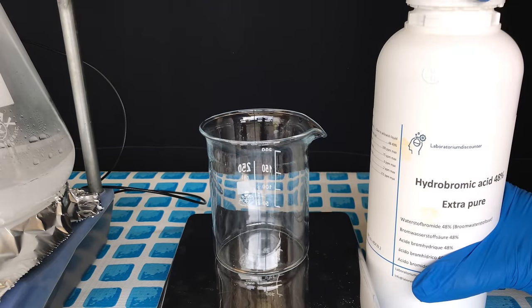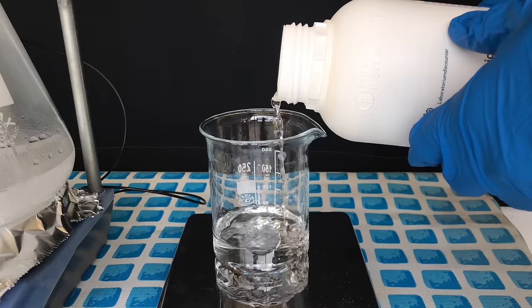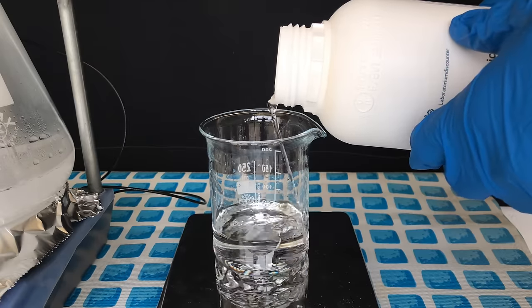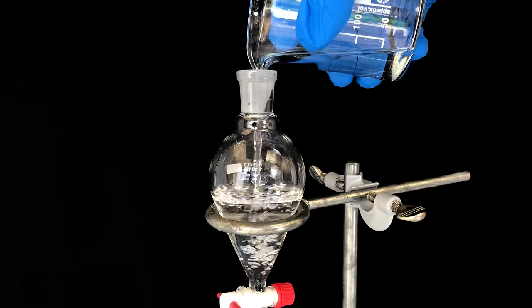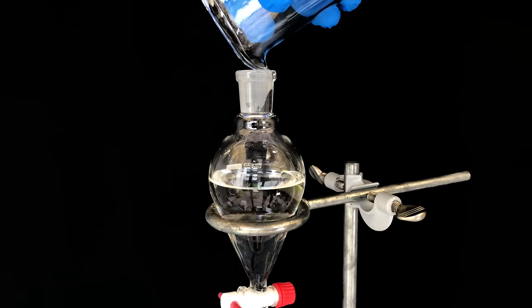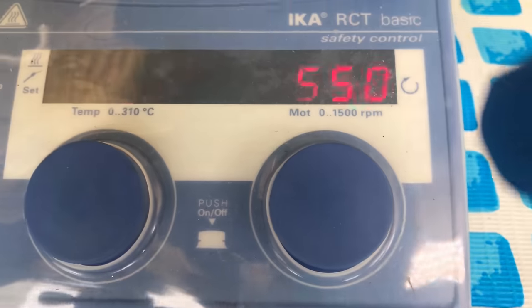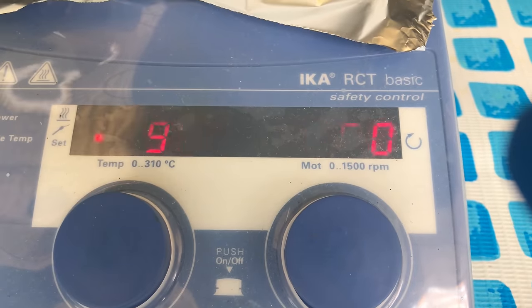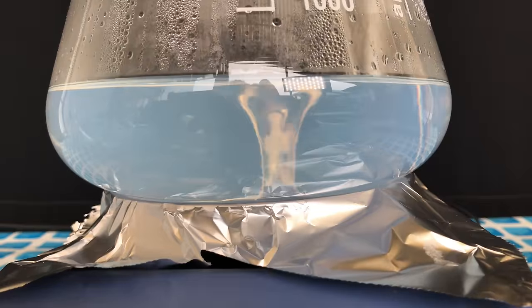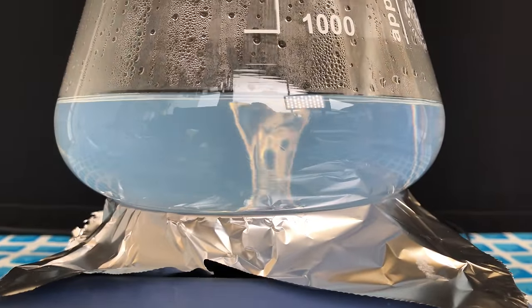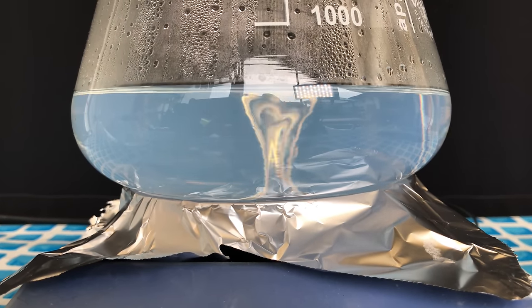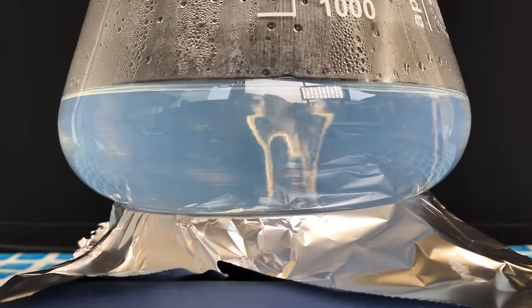Back to the hydrobromic acid. You're going to need about 130 grams, but you don't want to add too much, so you only add hydrobromic acid until the solution turns clear, and if you add too much, you're going to destroy your product. The hydrobromic acid was added slowly, while maintaining a reaction temperature of about 95 degrees Celsius. The acid was added over the course of 30 minutes, and in the end we were left with this clear, slightly blue solution. The moment the solution was clear, the acid addition was stopped. We added just a little under 130 grams.